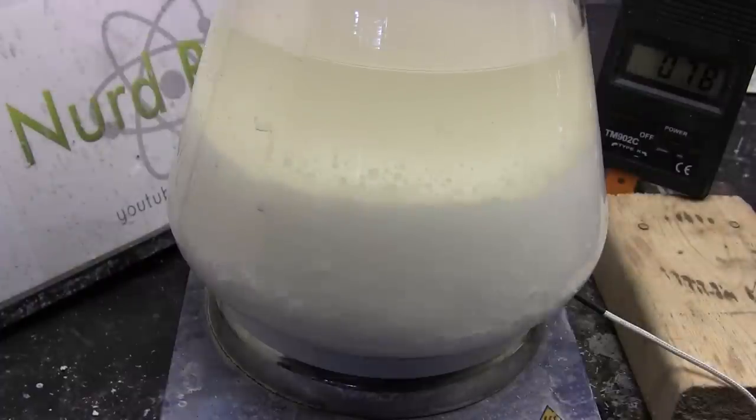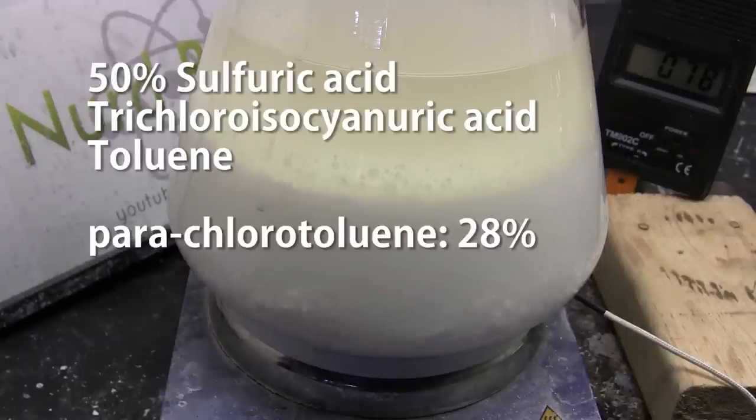The worst method I found was reacting a 50% sulfuric acid solution with toluene and trichloroisocyanuric acid. While it did produce chlorotoluenes in good yield only 28% was the desired para isomer. The rest was the unwanted ortho-isomer.